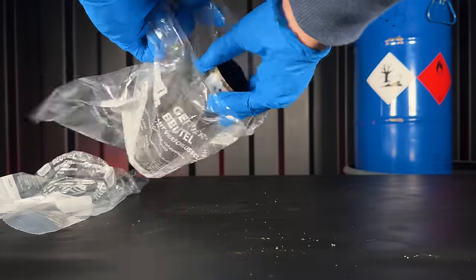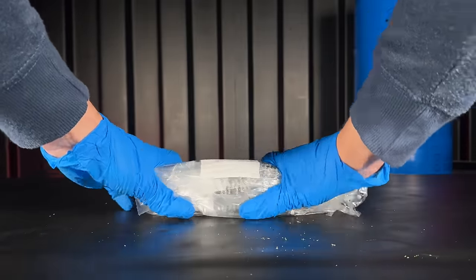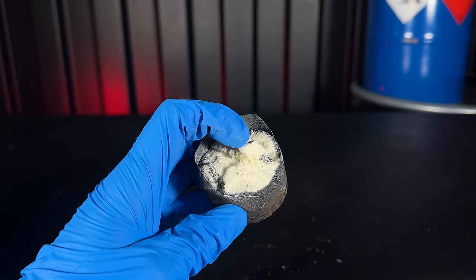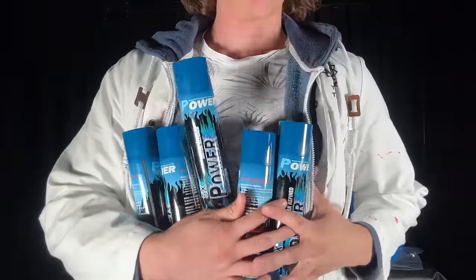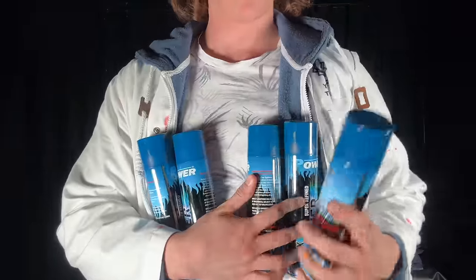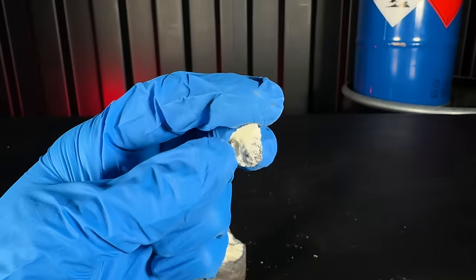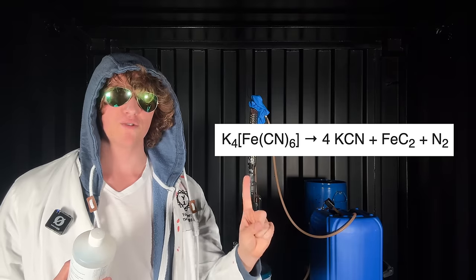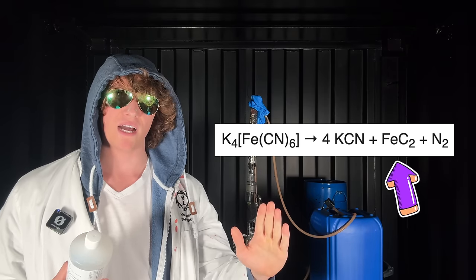I put it into plastic bags and hit it with a hammer until I discovered this—this is unreacted ferrocyanide, which never happened to me before. So I got more cans and tried it again. This time I got full conversion and not any of those white parts.